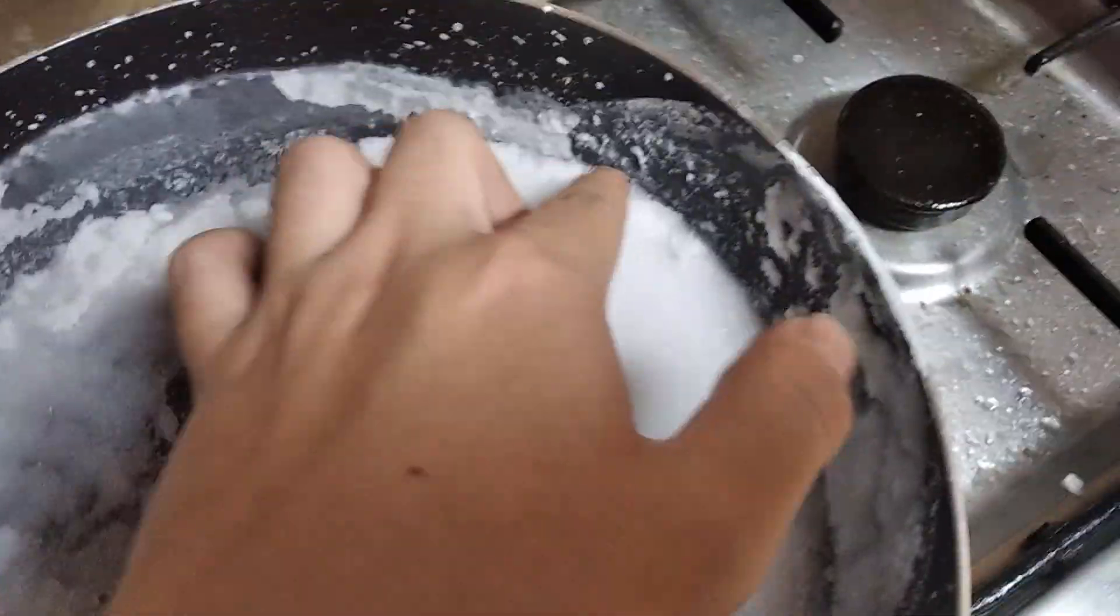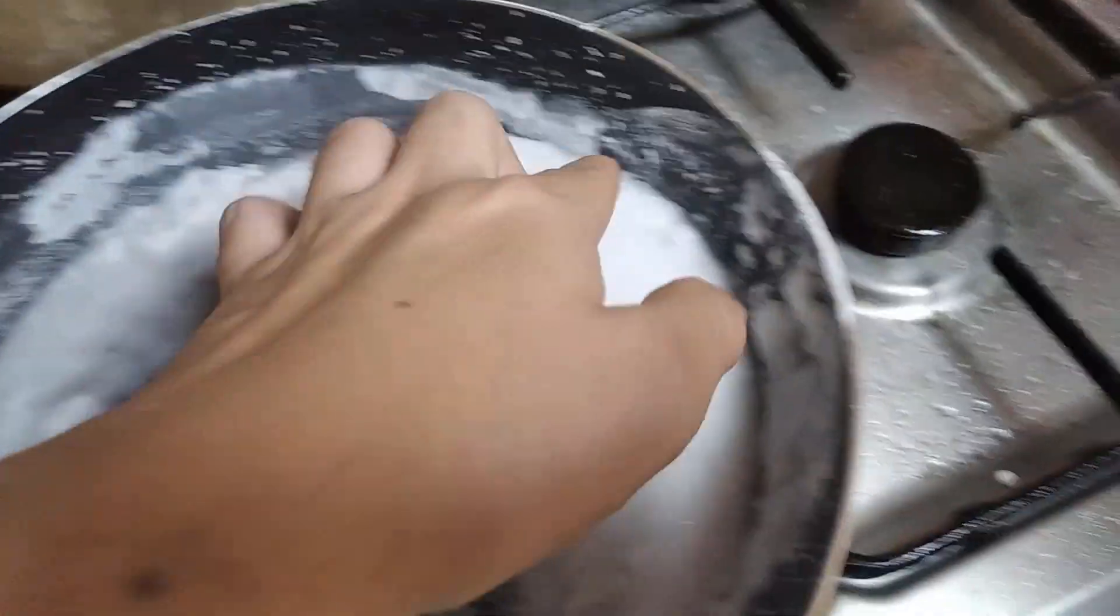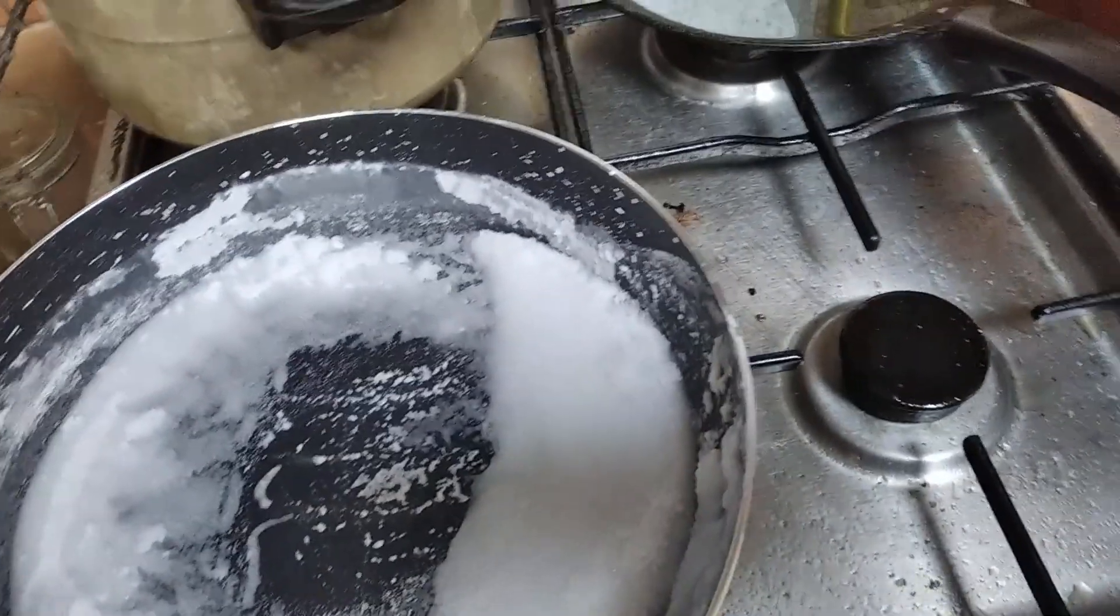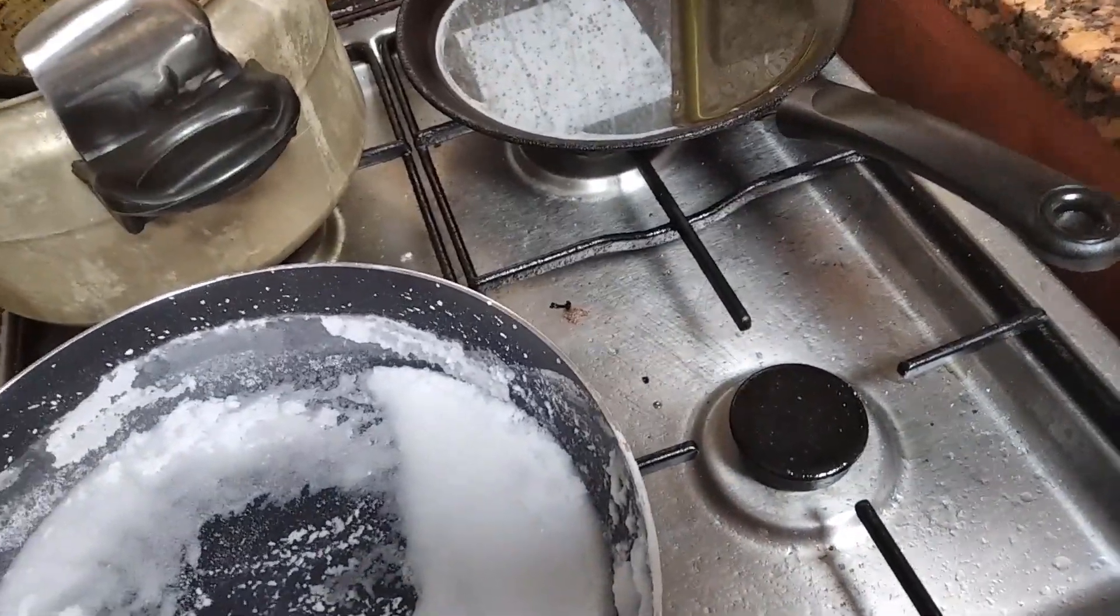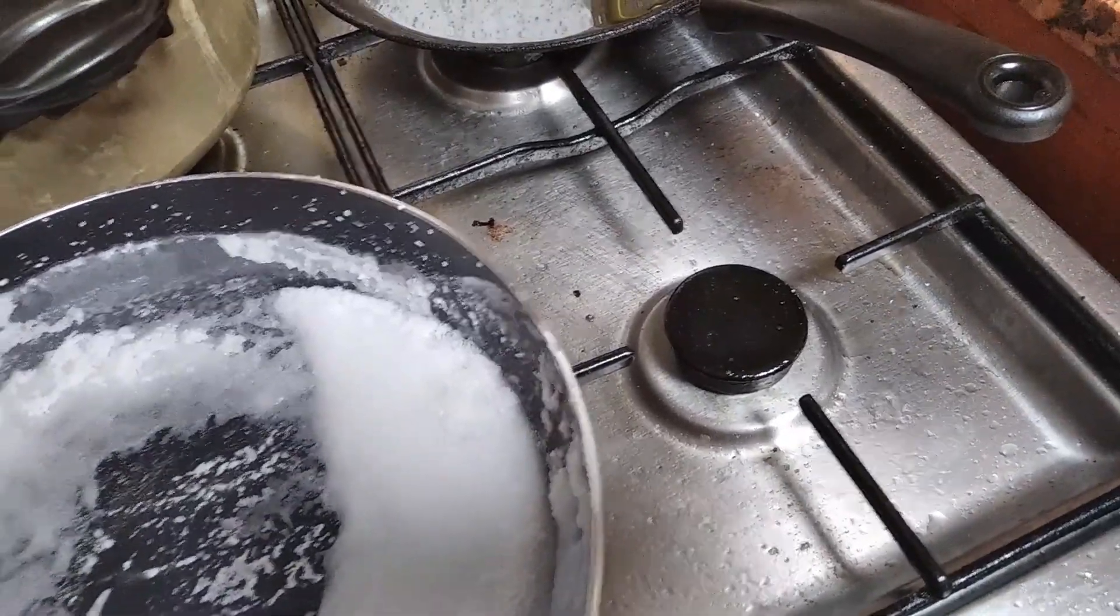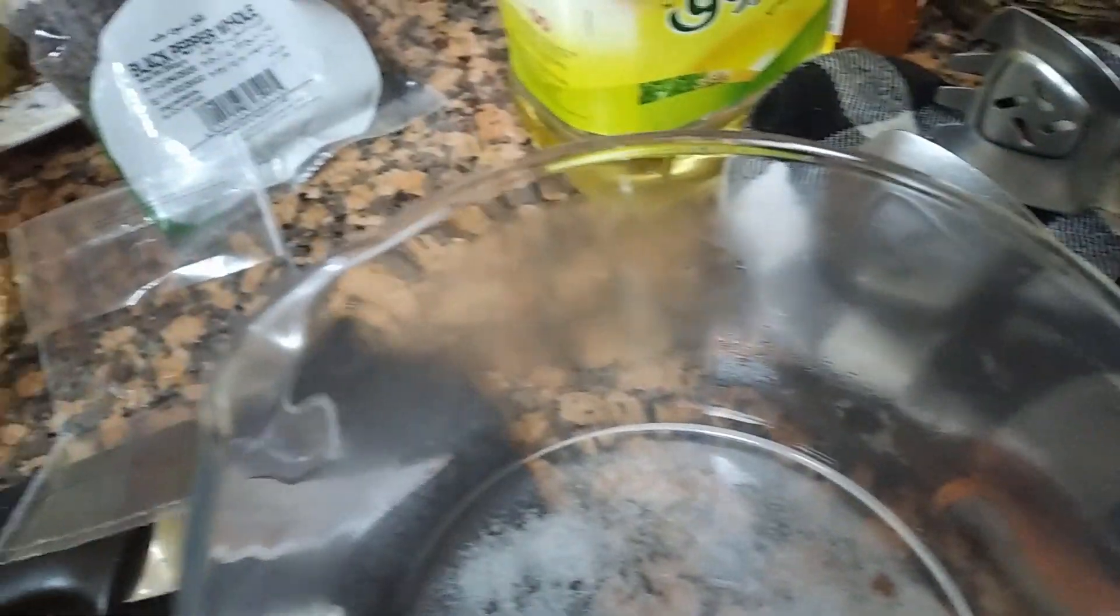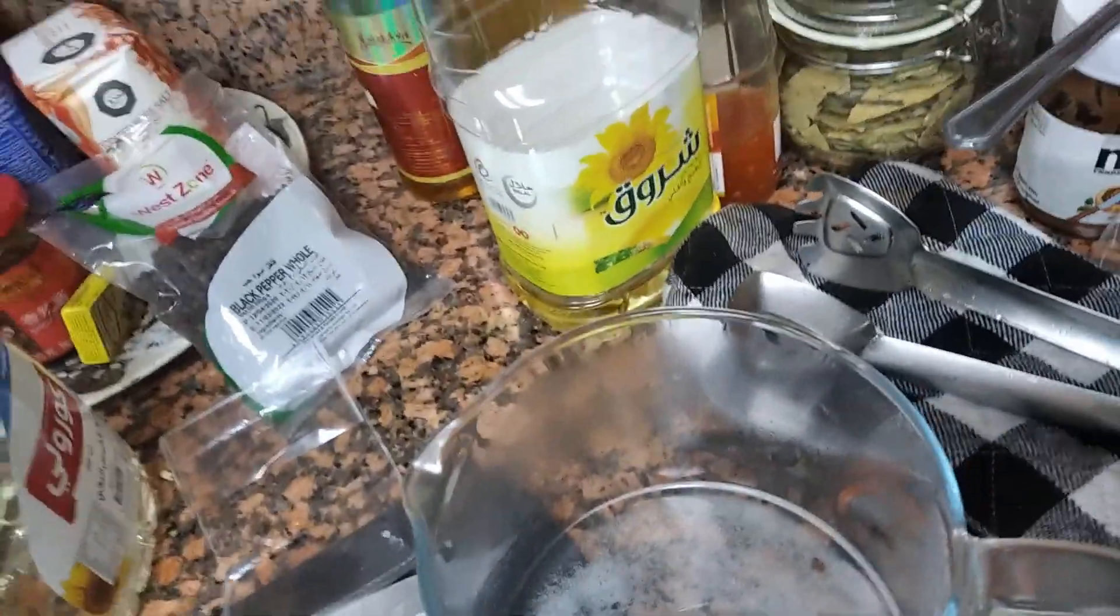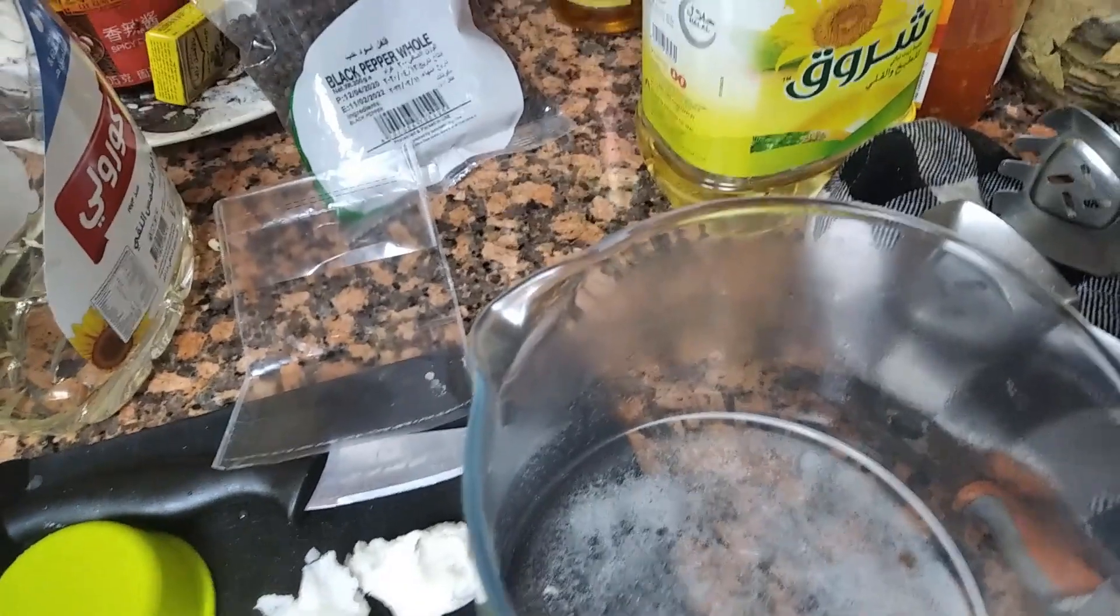So this is the salt after the extraction of the calcium chloride. The best way to tell if salt has no calcium chloride is to taste it. Wow, not bitter at all. It's still a little bitter in some spots where it's wet. Now here, this water. Holy crap. That's called pH control solution boys.